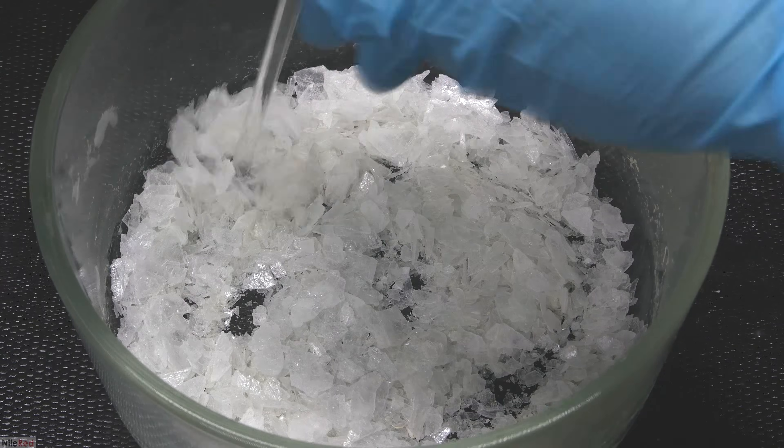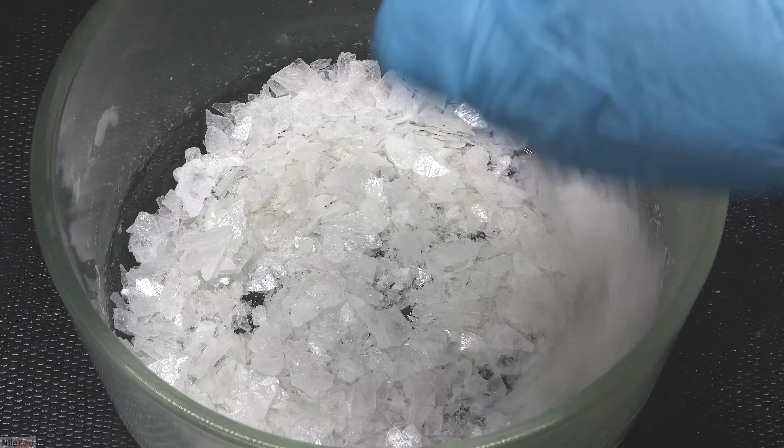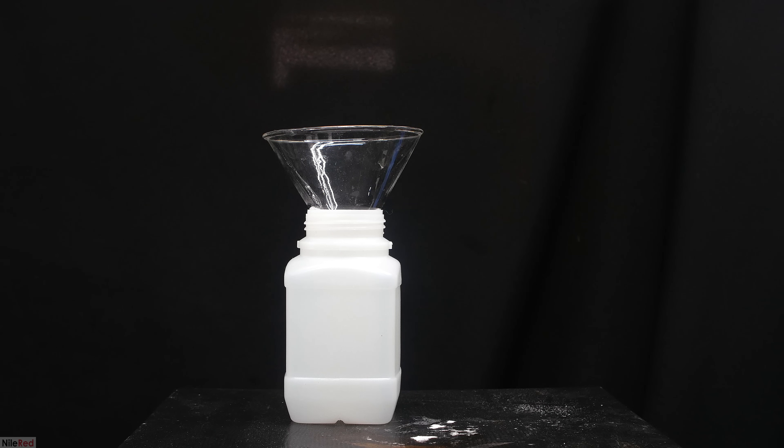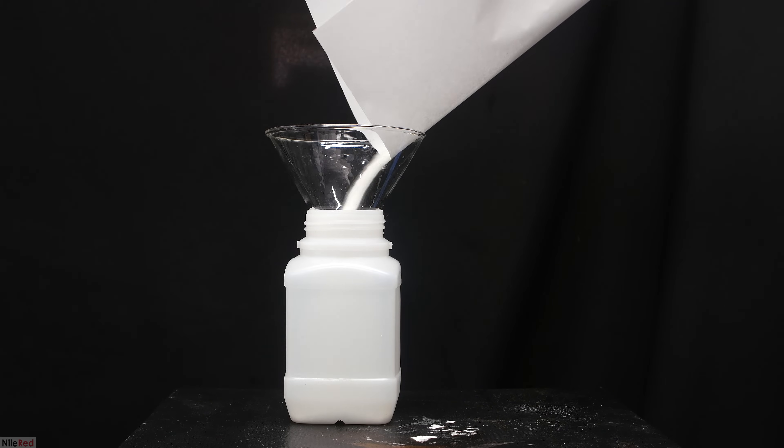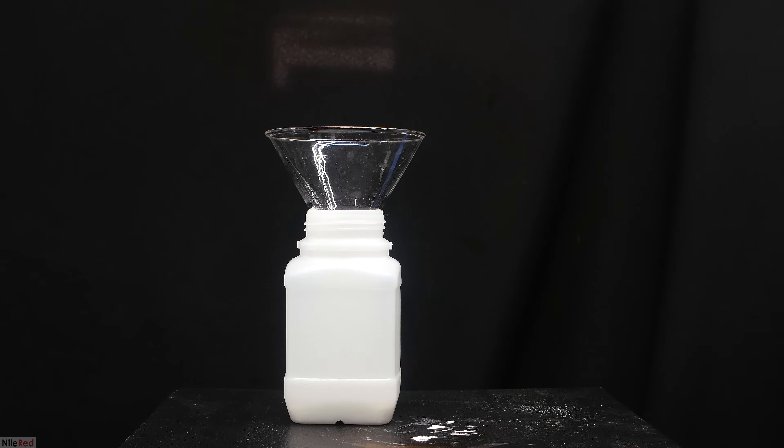After just a few days, I was left with some super dry silver nitrate crystals. I crushed the crystals into a powder using the bottom of a beaker and then I transferred them to a container for storage.